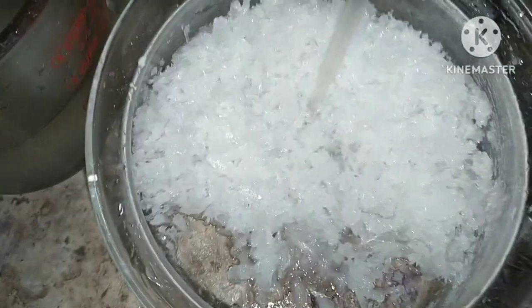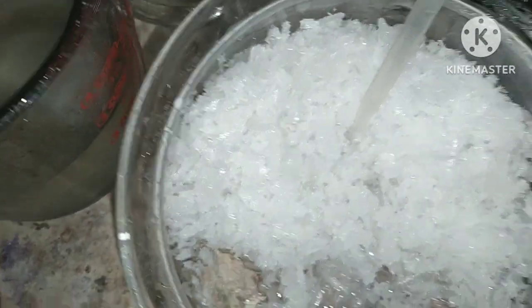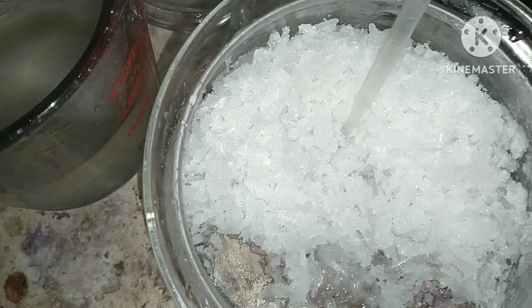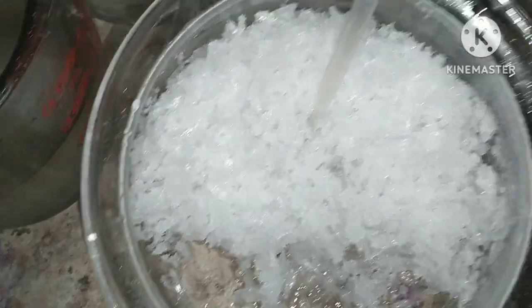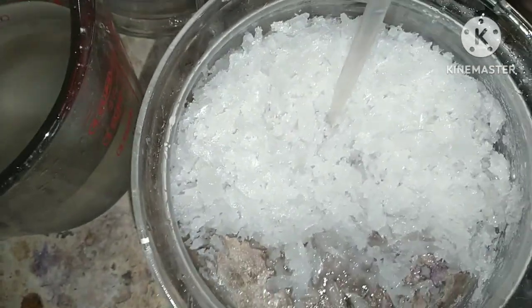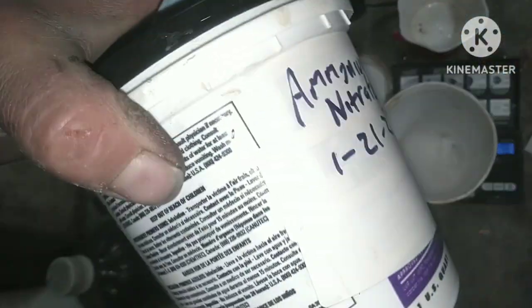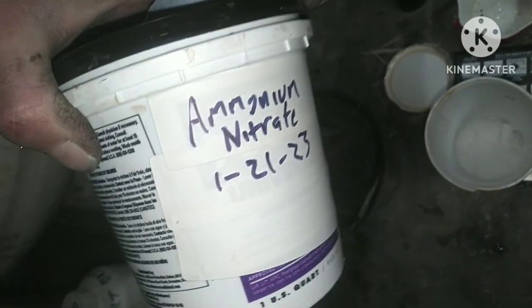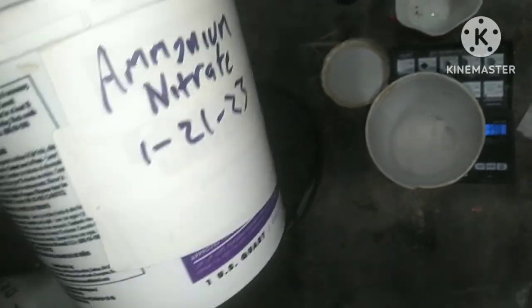And that's how you get ammonium nitrate, just like that. To finish off your ammonium nitrate, you just filter it, then heat it up in an oven to dry it out, and put it in a nice storage container — that part's done. Now I'll get this ready for the next part. I've got all my ammonium nitrate in here. Don't forget, always label your stuff — it's so easy to forget when you've got tons of different chemicals.